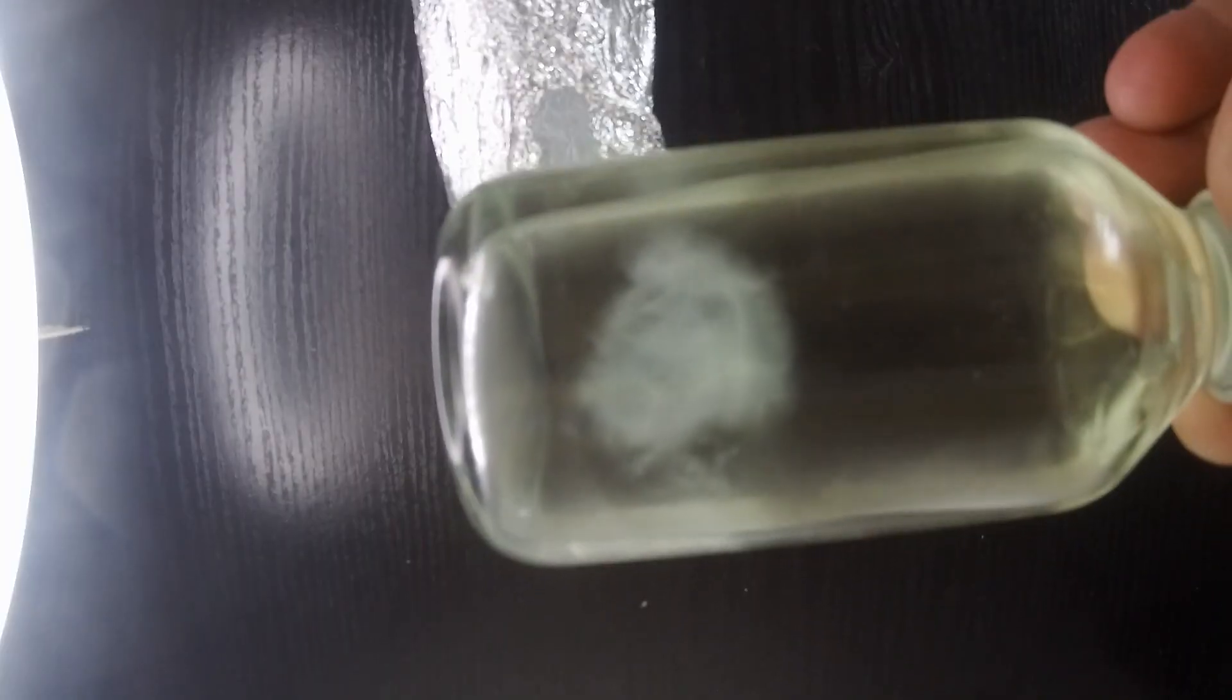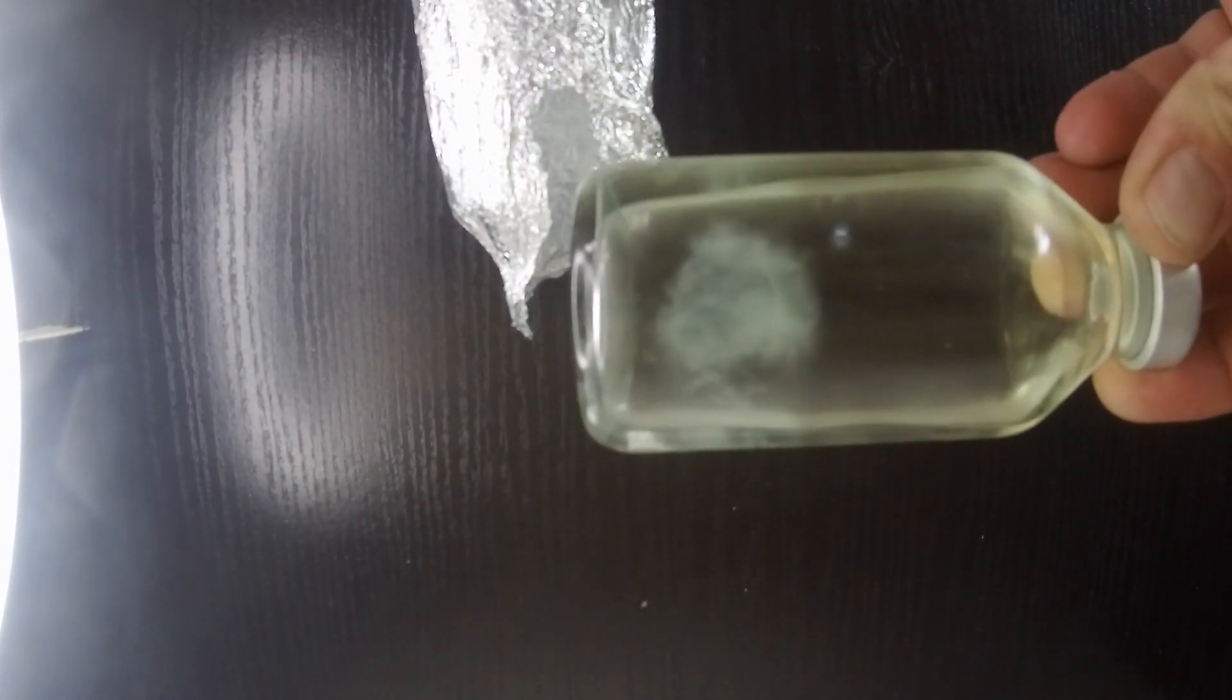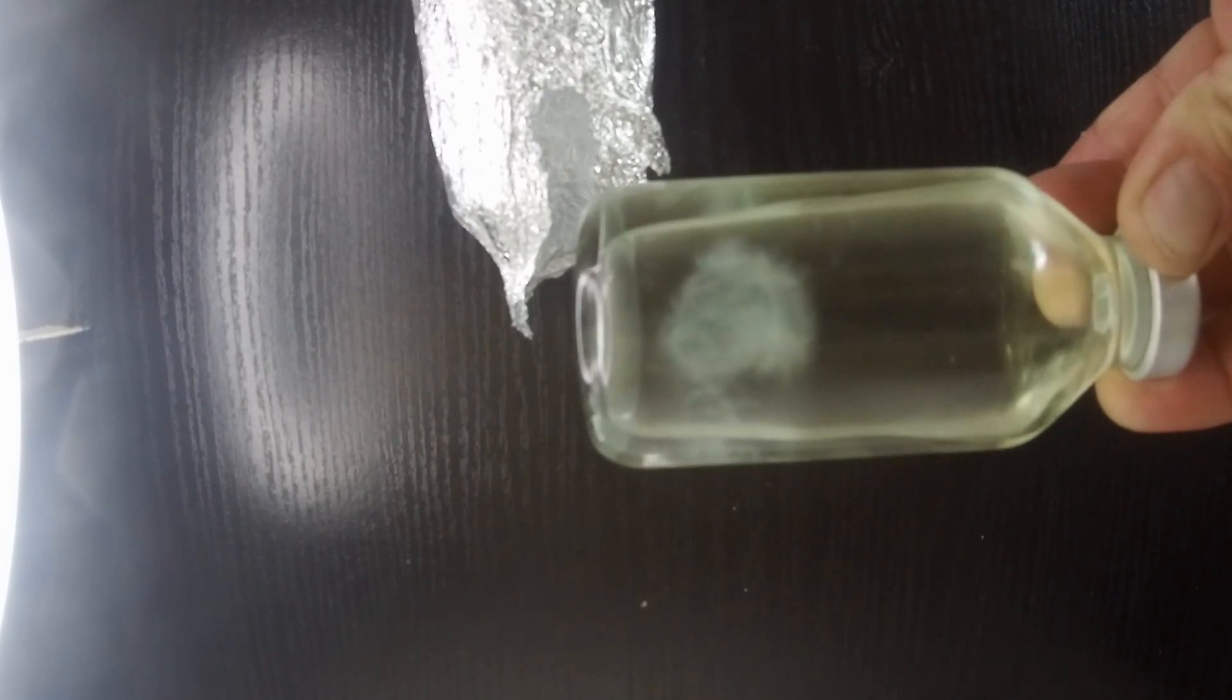The vials should be stored, wrapped in tin foil, in a dark, cold place. A fridge is good enough.